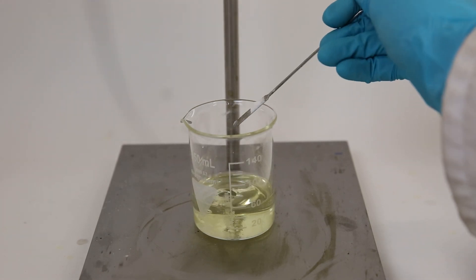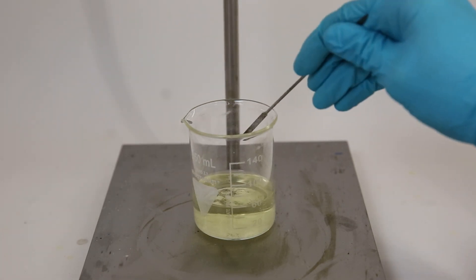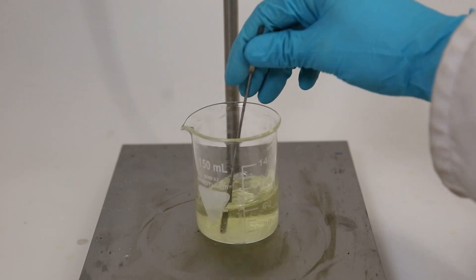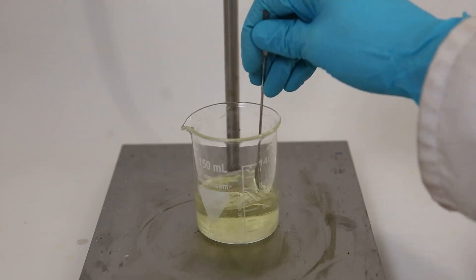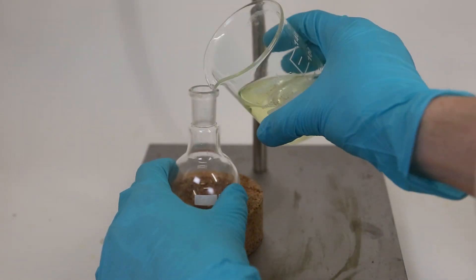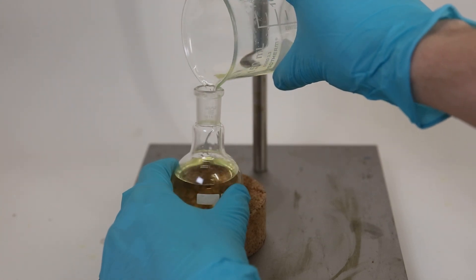To remove any acid that might be present, I add some scoops of sodium bicarbonate. But nothing happened and all of it just sat on the bottom. Because it all just sits there, I can simply pour it into a flask without needing to filter it.